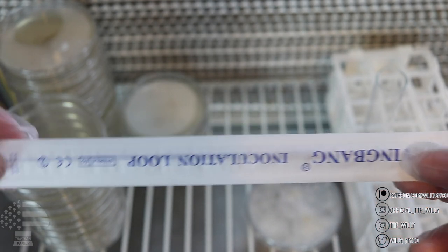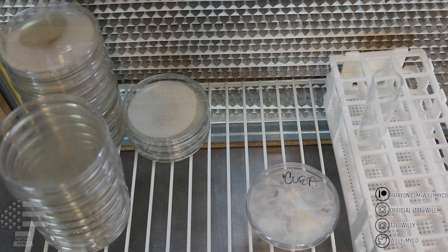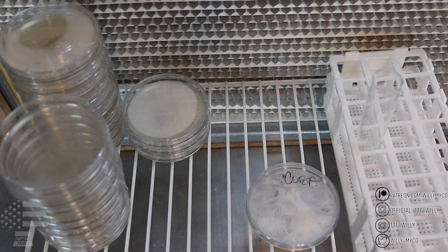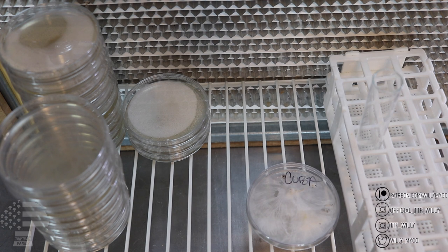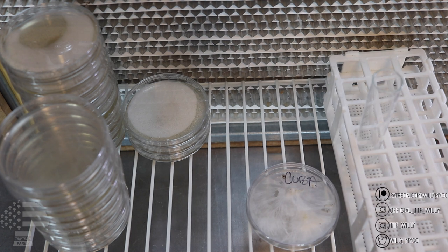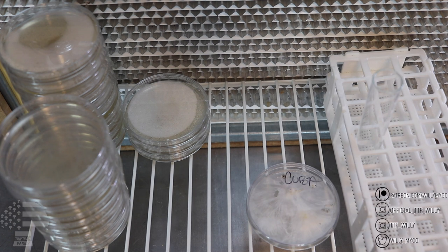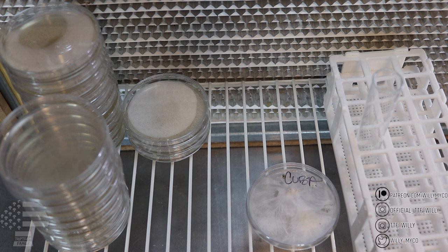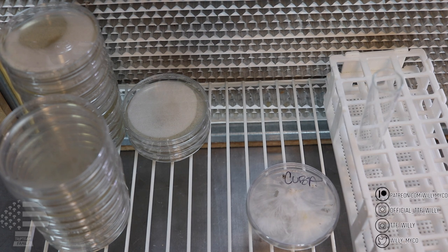This is a sterile inoculation loop — there are different sizes, and even though they come sterile, we still want to use isopropyl alcohol just to make sure. So the first thing we're going to do is make circular cuts and new transfers. A lot of you have been asking how mycologists get circular cuts, and the answer is really simple: they're just using a straw or a hole punch — one or the other, you get the same results. What we're using in this video is a metal straw, because it's extremely accessible — you can get one at Target, Walmart, really anywhere.